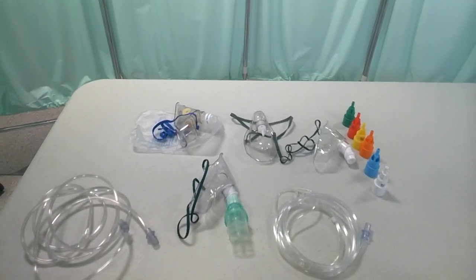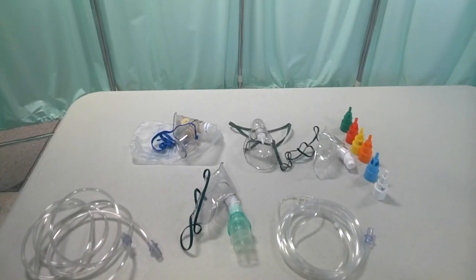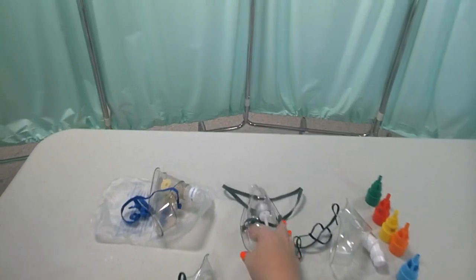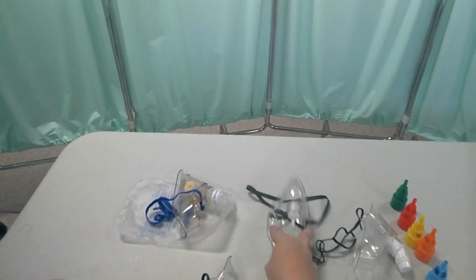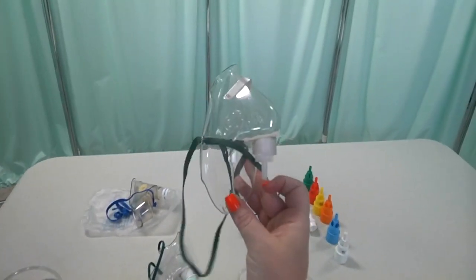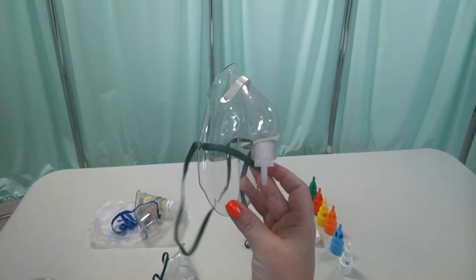Here is our table of oxygen delivery equipment, and we're going to discuss in a little more detail now about the simple face mask, which is also called the Hudson mask.